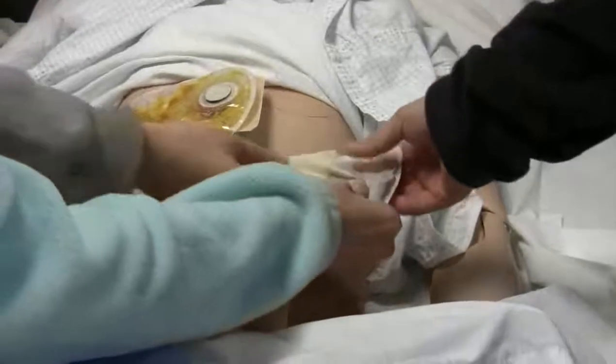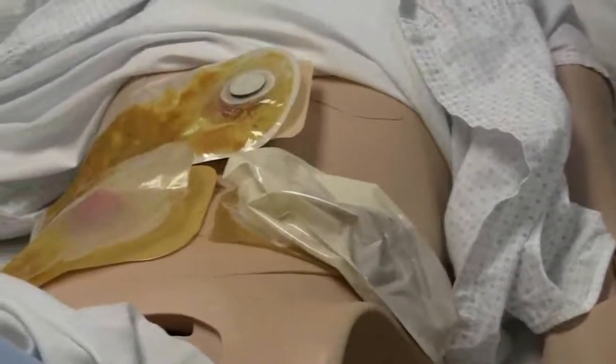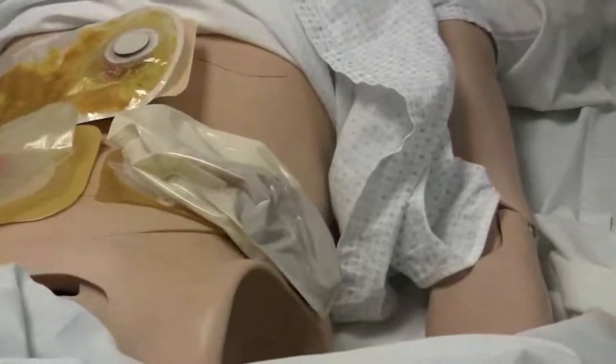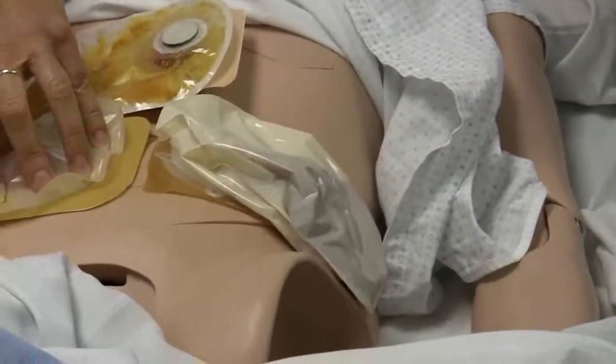How about this one over here — where is it located, what type of ostomy? Descending or sigmoid, because it is getting low. What do we expect from that effluent? More formed, more like a regular stool — we've absorbed the water. With this type, there's no opening at the end to drain routinely, it's disposable, and I'd expect more normal stools, maybe only one every two days — not like the ileostomy that we empty every two to four hours.